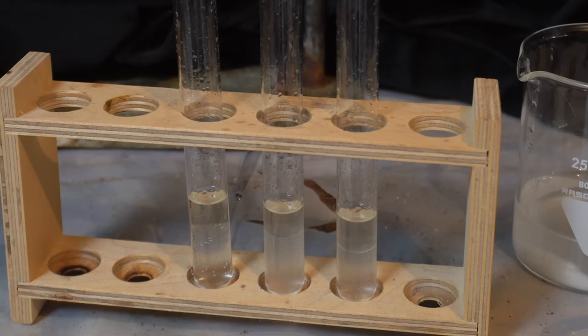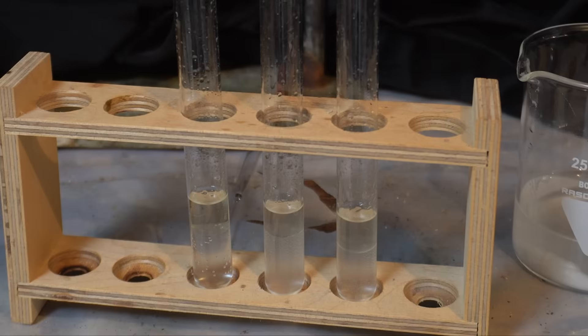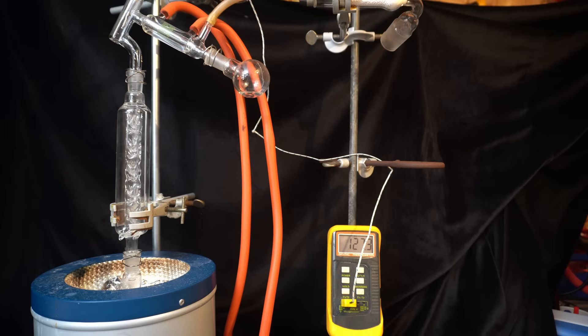All of these esters have a fairly pleasant fruity smell. Except for this one, it just smells like glue. If you wanted to purify these, you can distill them at this point, but I don't have a use for them, so I'm not gonna do that.